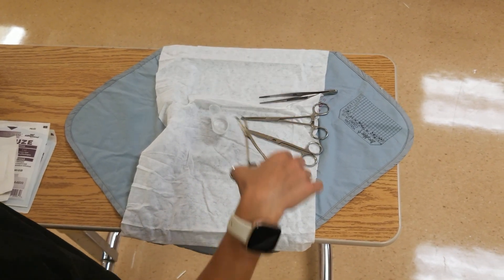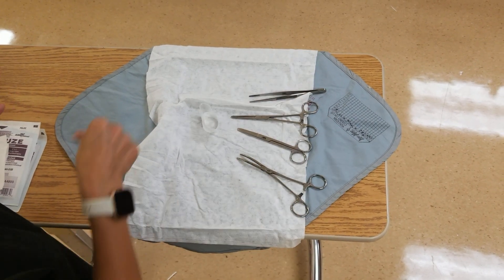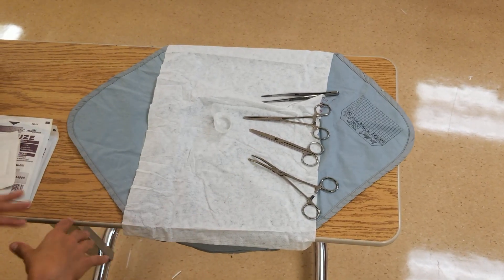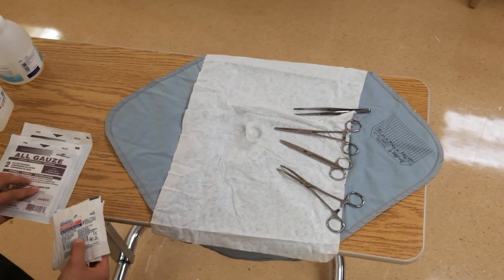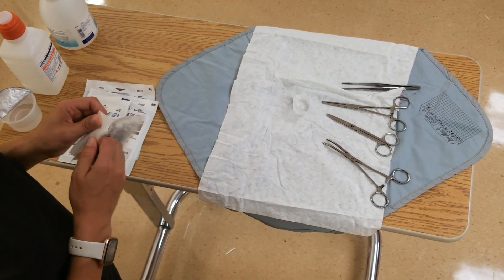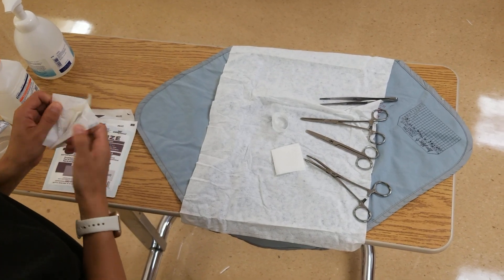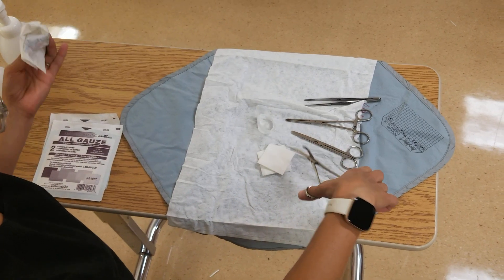I count the white part as my sterile field and that's where my one-inch border is. You can kind of even see it with the folds. You'll also notice with this type of kit there's no gauze added to it, so just a heads up to remember to bring the supplies that you need. You add them to the kit in the same fashion — either opening it away and dumping it into the field, or opening it and passing it to yourself using your forceps.